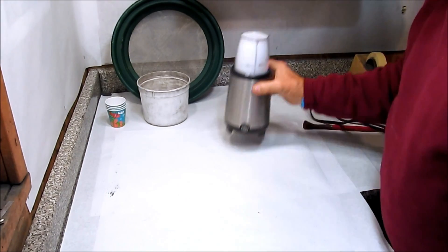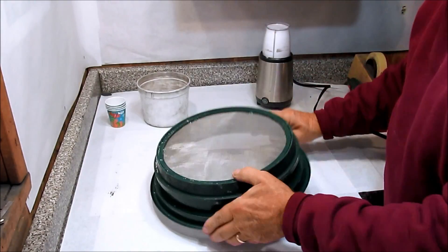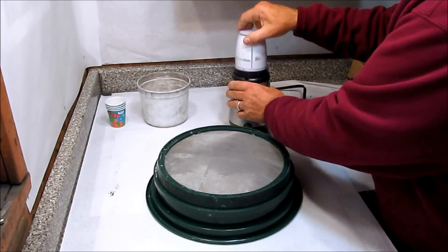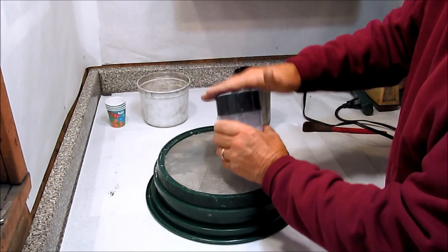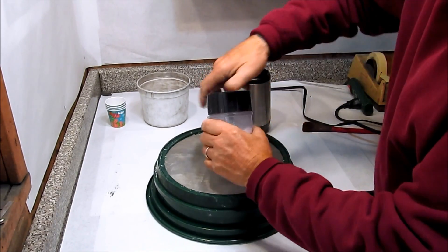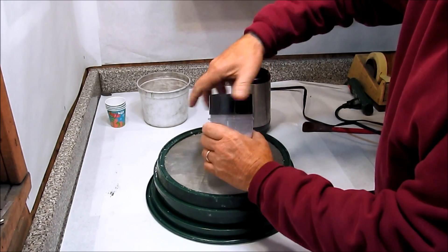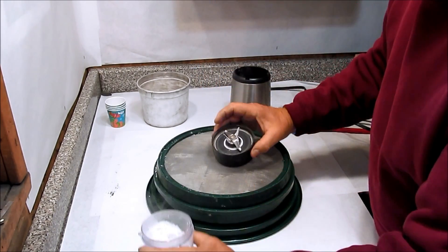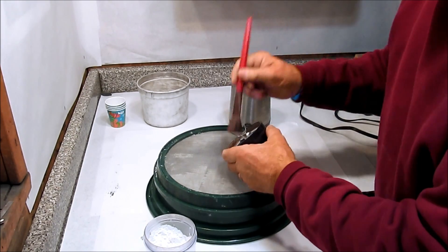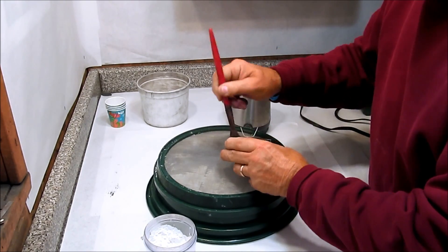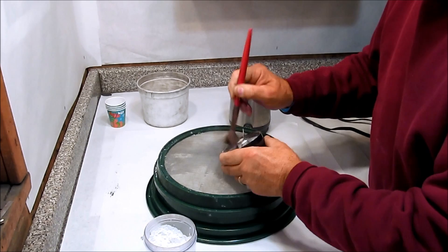So let's see what we have. Once I'm done using this, it's very easily washed out with a hose or in the sink.